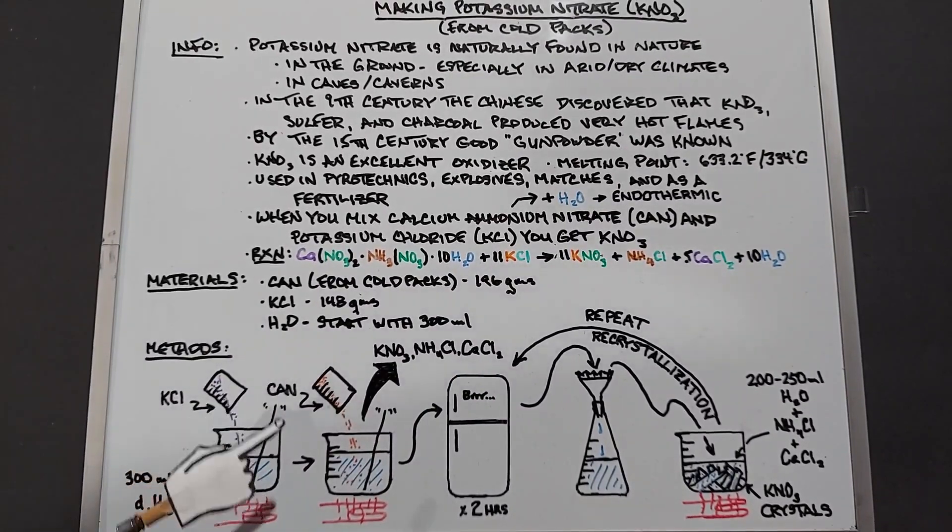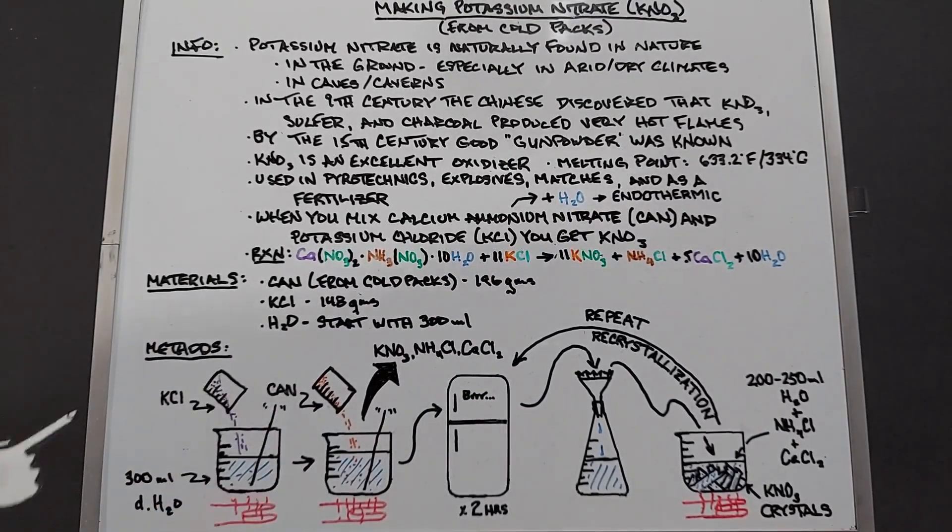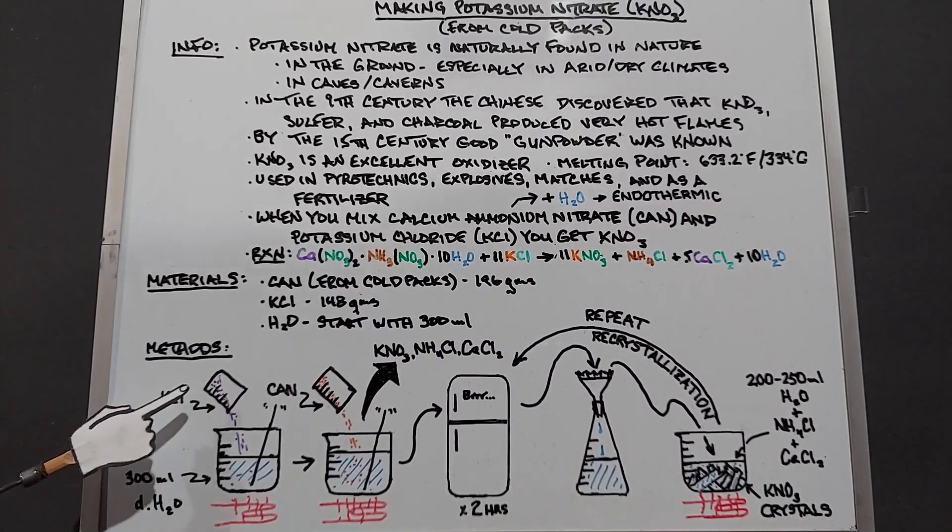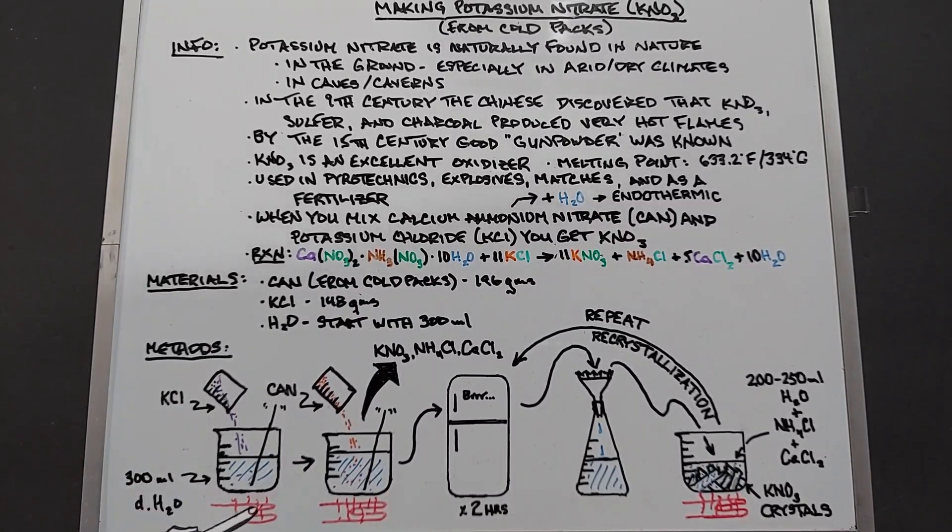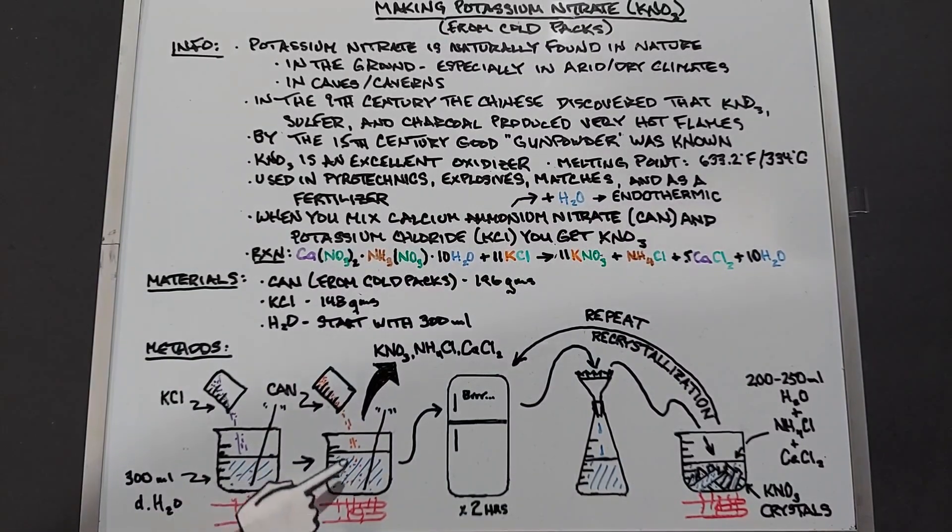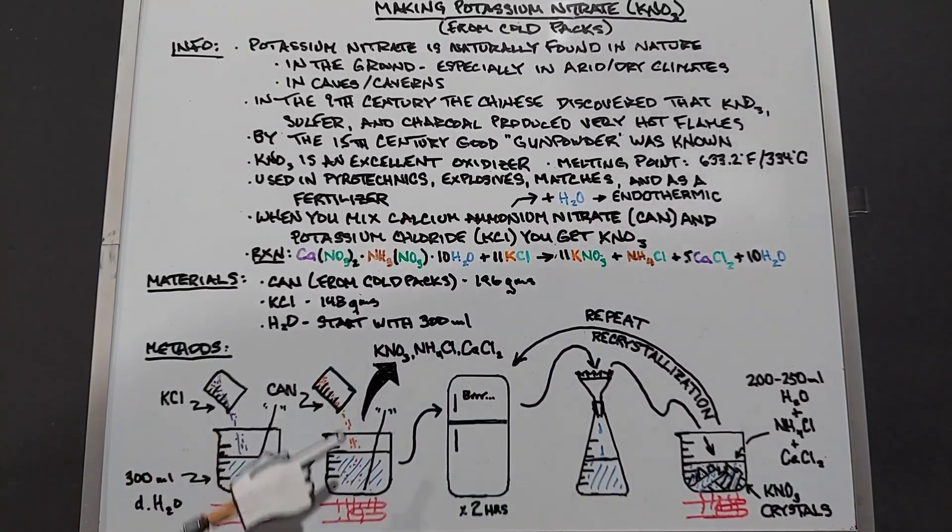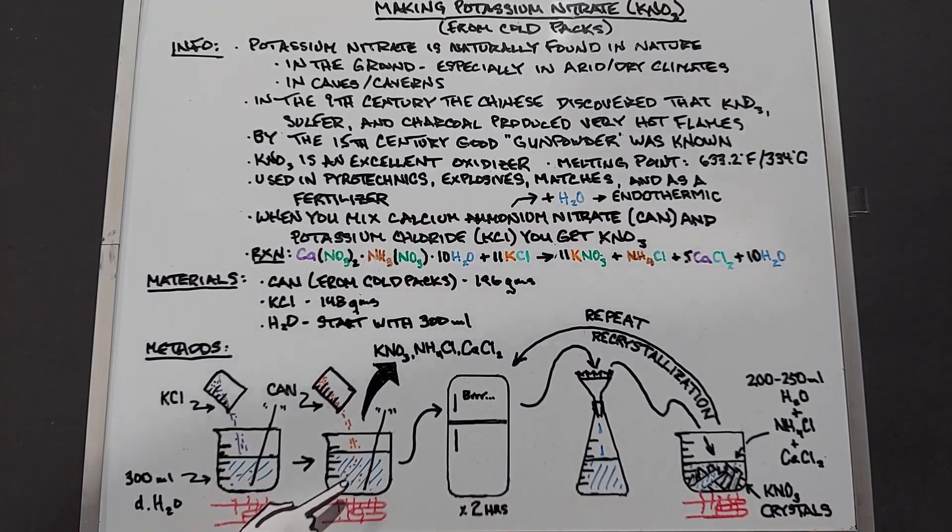In our methods, in order to perform this double displacement reaction, we're going to take a beaker, fill it with 300 milliliters of distilled water, and we're going to put our potassium chloride in there and heat it until it's all dissolved. Once it's dissolved we're going to add our calcium ammonia nitrate and dissolve that in there also, so both the potassium chloride and the CAN are dissolved in 300 milliliters of water and it's heated until everything's dissolved.